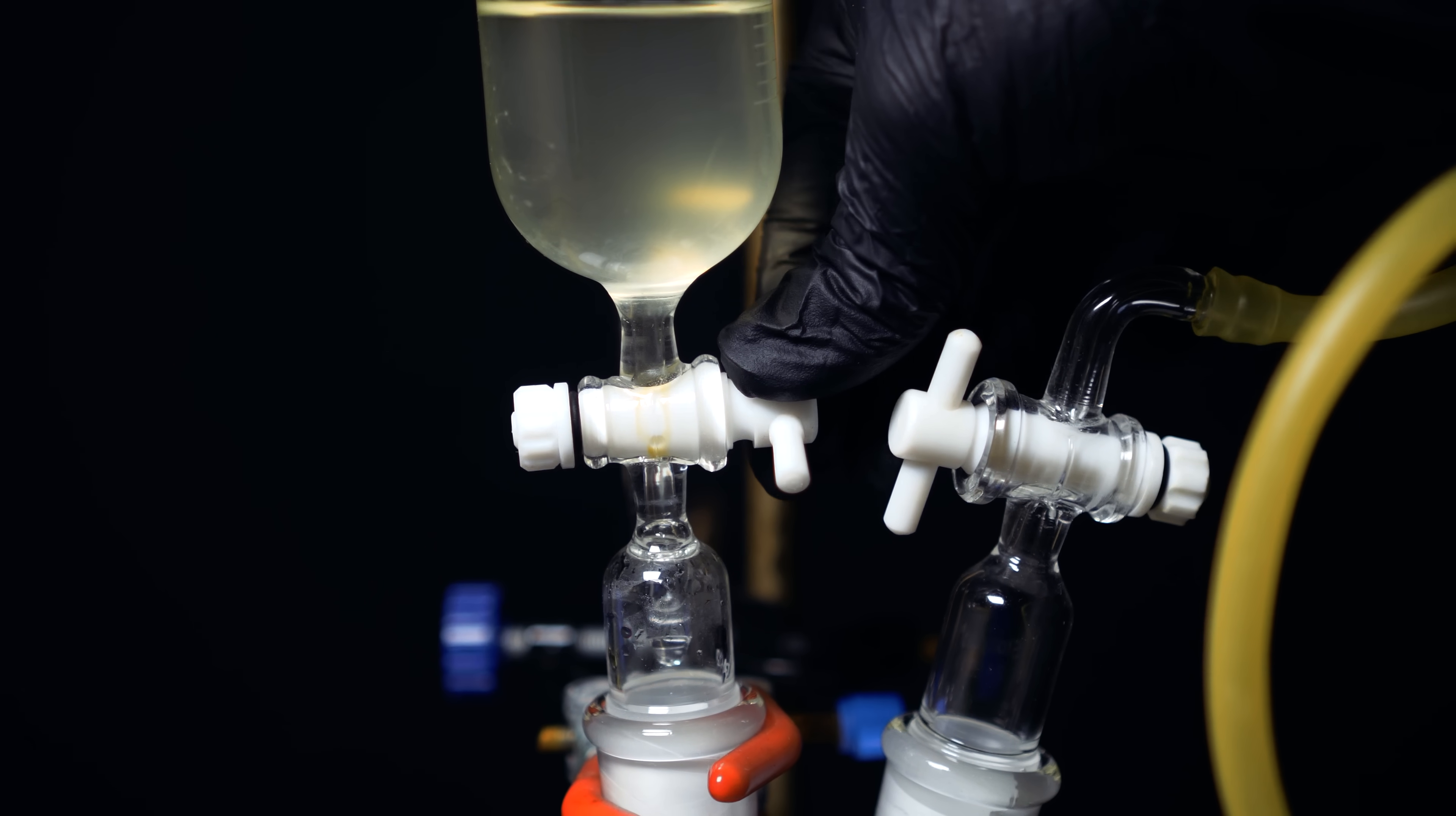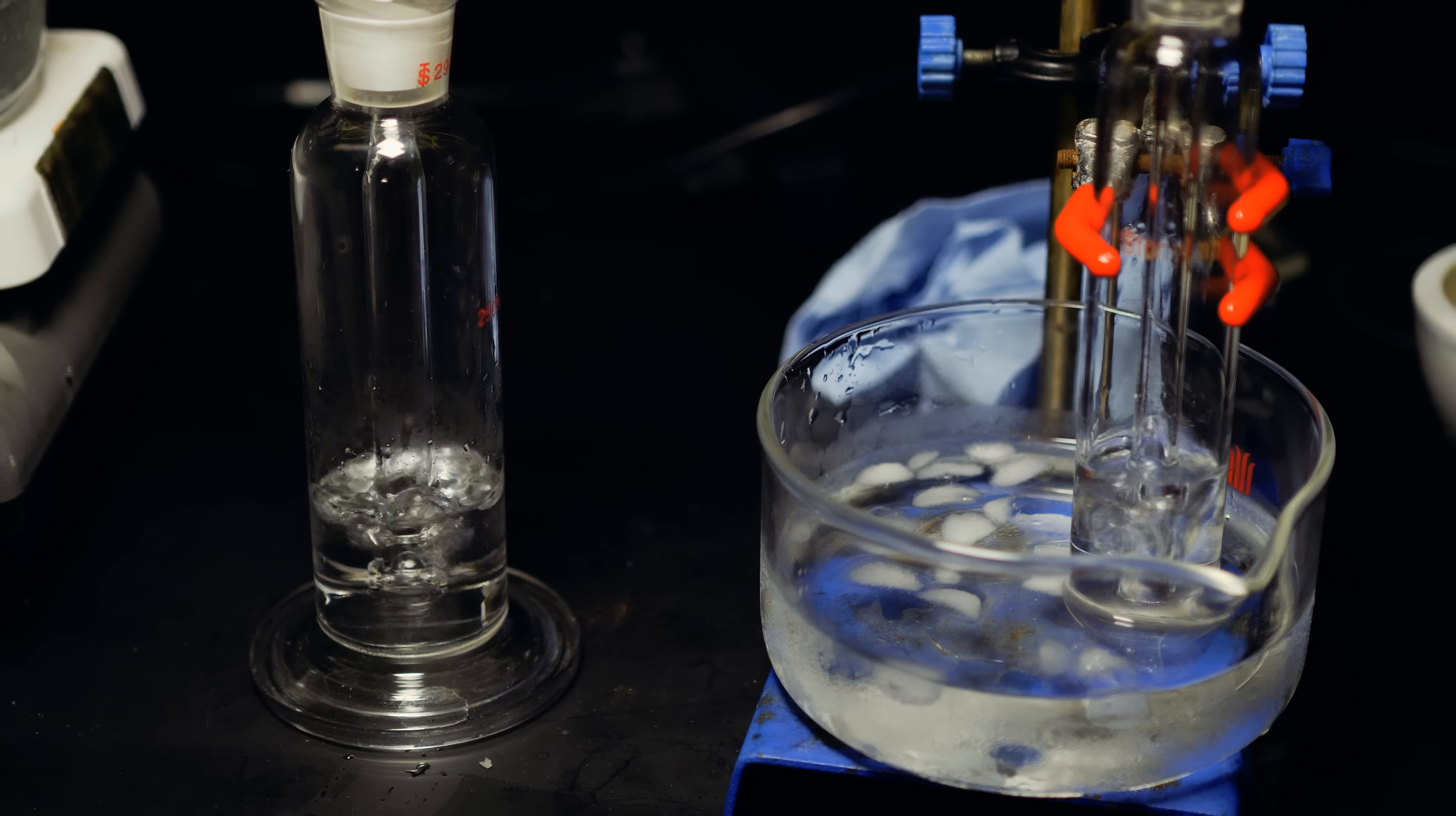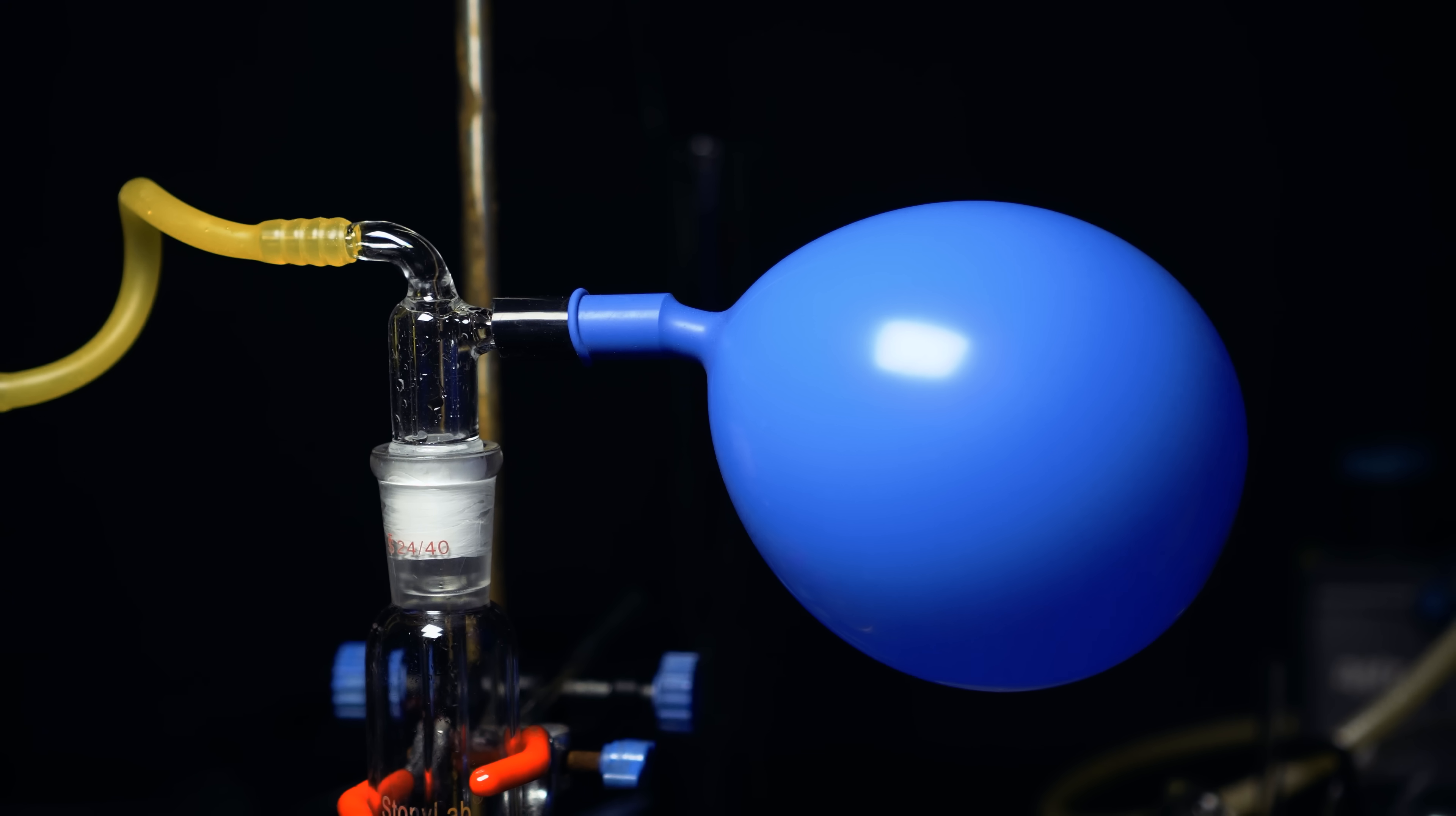At this point, I also decided to increase the drip rate, which would increase the production of nitrous oxide. And just like that, the balloon was getting extremely erect. No diddy. And here, you can see a full display of both of our gas washing bottles working accordingly. The balloon kept getting bigger and bigger. It got to the point where the balloon was getting too filled out and a fresh new balloon had to be put on, which also filled up quite nicely and quite fast.